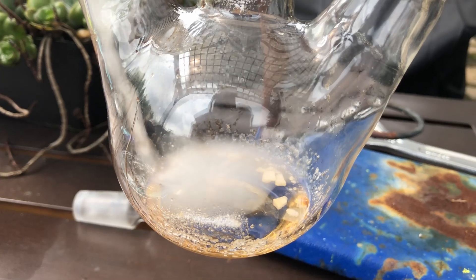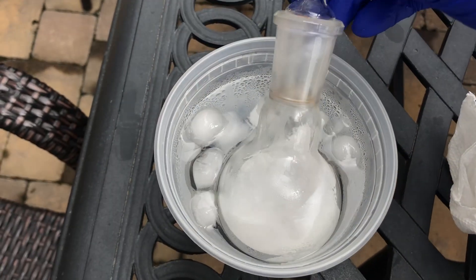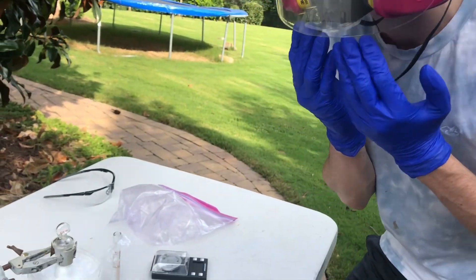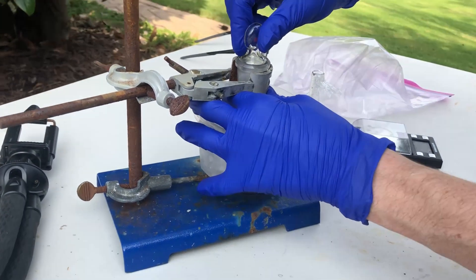Here's a cool effect that I saw when I opened up the cap when cleaning this glassware. Anyways, now that I have my pure sulfur trioxide, it's time to turn it into 65% oleum. Face mask. Everything. So now we need to open it.